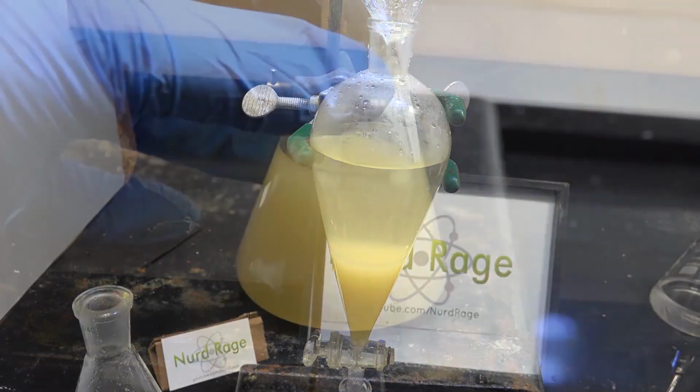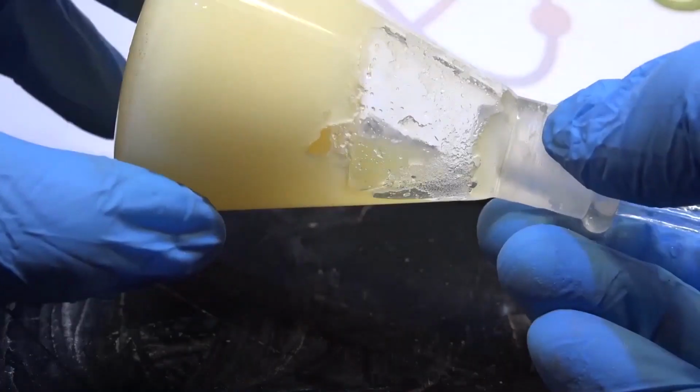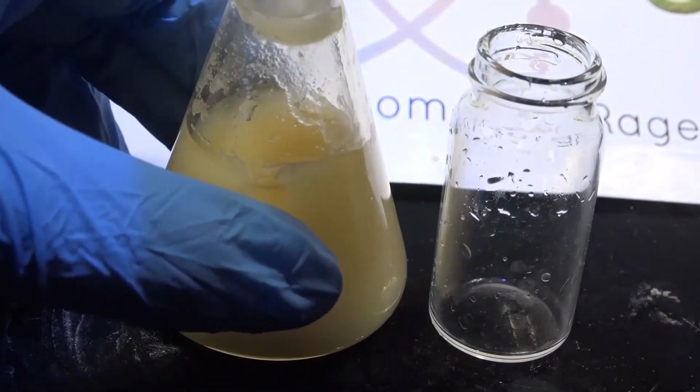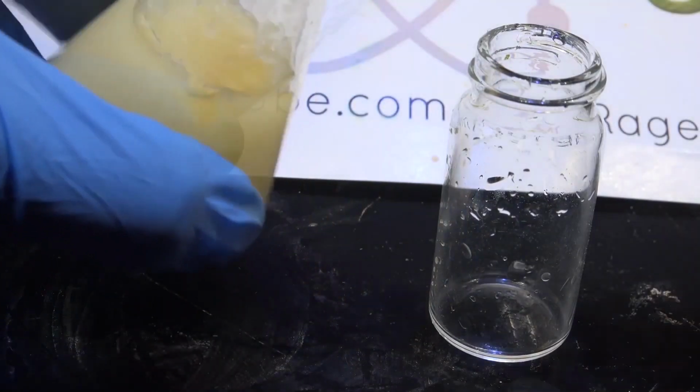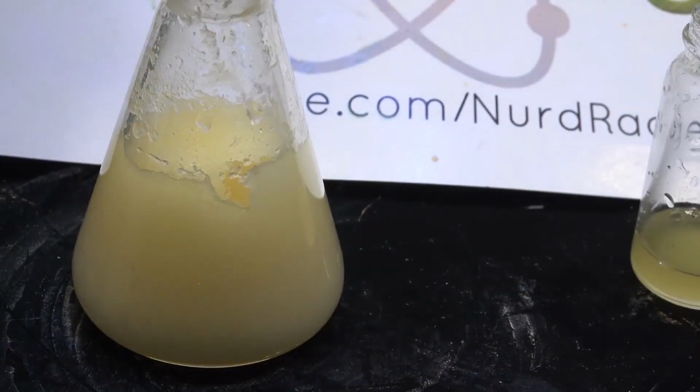To increase our purity further, we cool the mixture in the refrigerator to 5 Celsius and let it crystallize. p-Chlorophenyl acetonitrile has a melting point of about room temperature, so we can purify it that way. Just pour off what doesn't solidify. And there we have it, 44 grams of crude product.